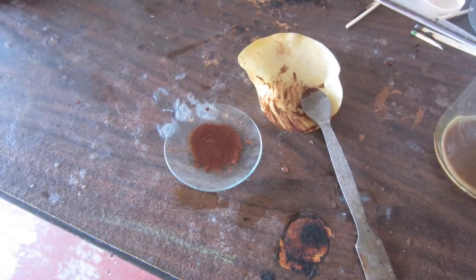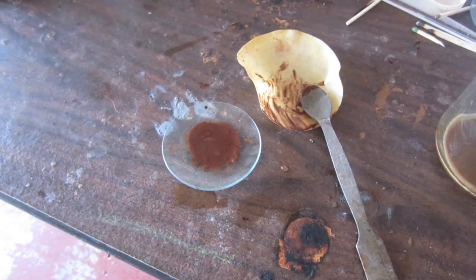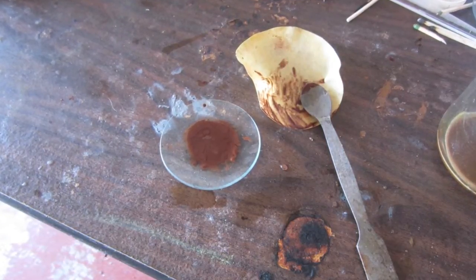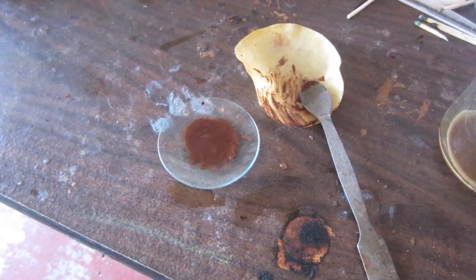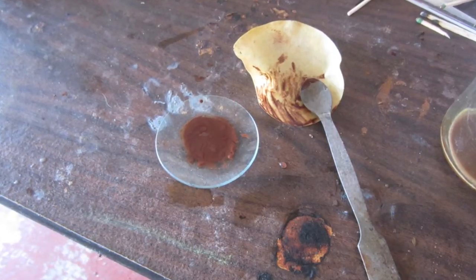I'm going to show you how to make chromium triamine diperoxide, a very interesting compound of chromium featuring chromium in the rare oxidation state of plus 4.